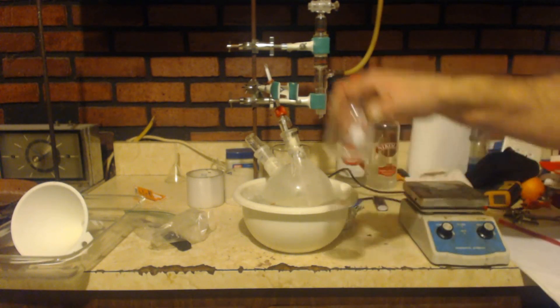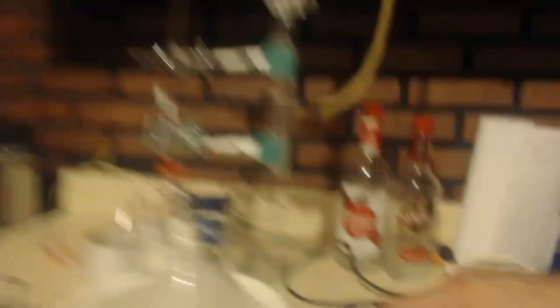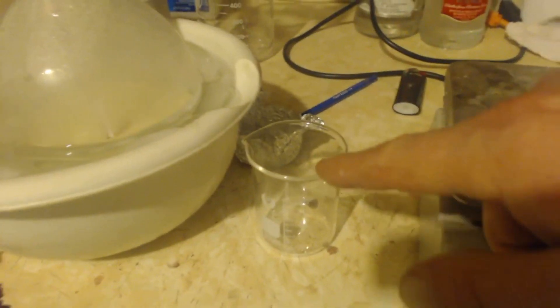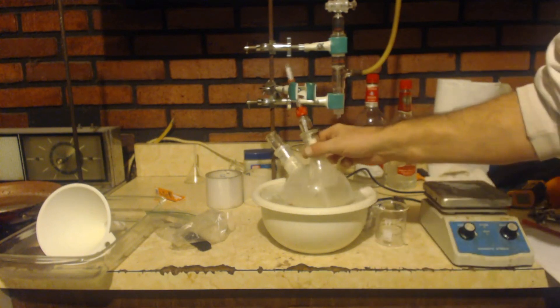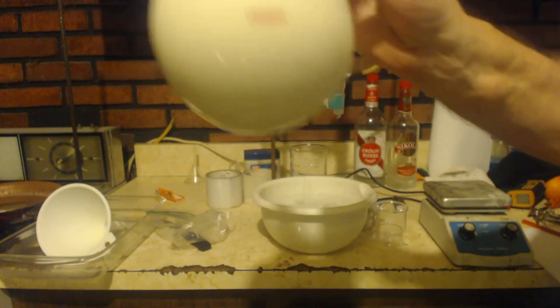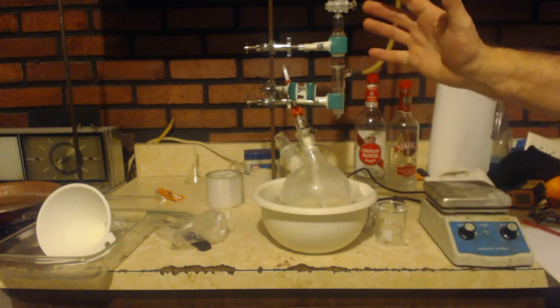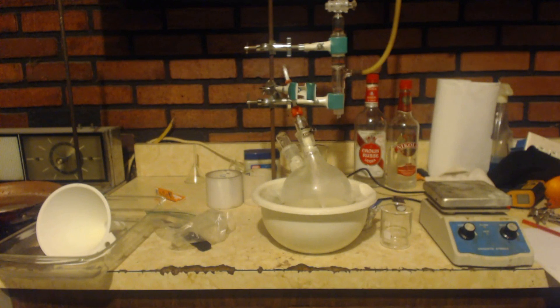Another thing — I had my ethyl bromide and diethyl ether being added from this container, and I can see there's kind of an indentation on it. A couple little drops came out and went into this thingy here, say a milliliter. I think this is a water-sensitive reaction. Because the byproduct is going to be an ester, and when you think about making an organic ester like ethyl acetate, acid catalyzes the reaction. So I'm guessing you shouldn't have any protons in here — meaning any alcohol or water — as anything like that might promote ester formation instead of nitro formation.